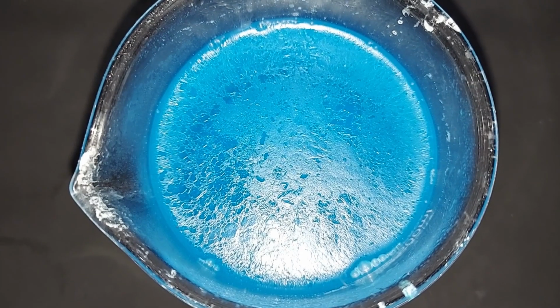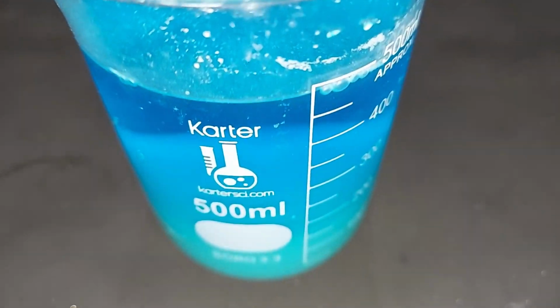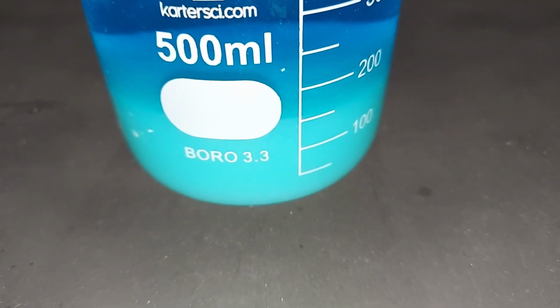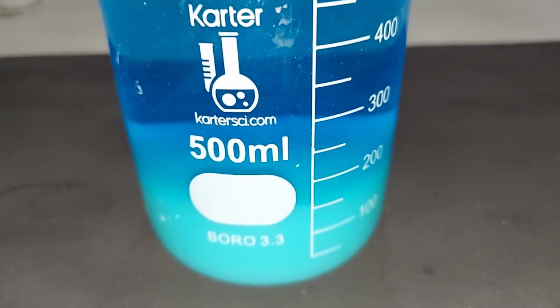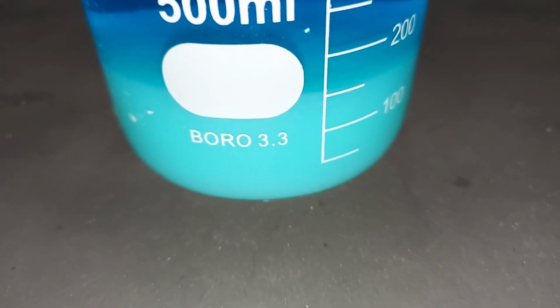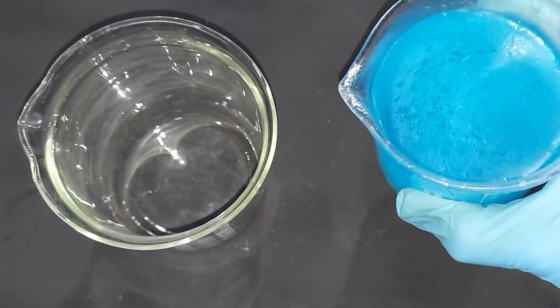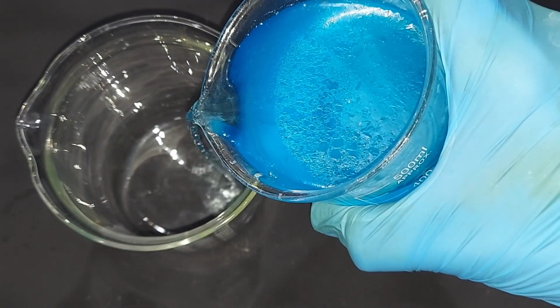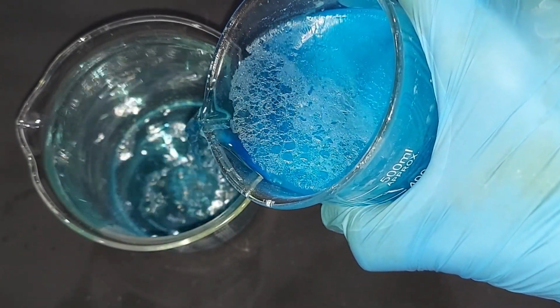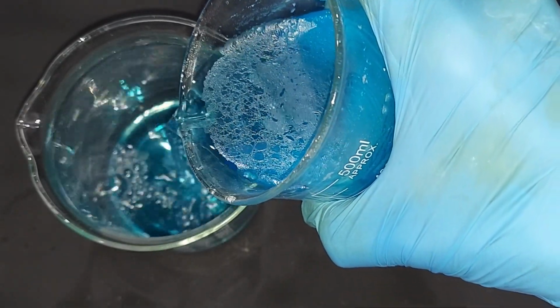The copper carbonate is so fine, I could not find a filter paper to filter it out of the solution. It went through every filter paper I had, so I let this sit overnight, and it's obviously nicely come to the bottom of this beaker. So what I'll do is decant what's off top here, and I need to get filter papers that will actually filter this out of whatever remaining solution there is. So I'll be decanting this into the 1 liter beaker I have on the left here best I can. I have no idea how much this precipitate will want to float about in here, so watch it carefully.